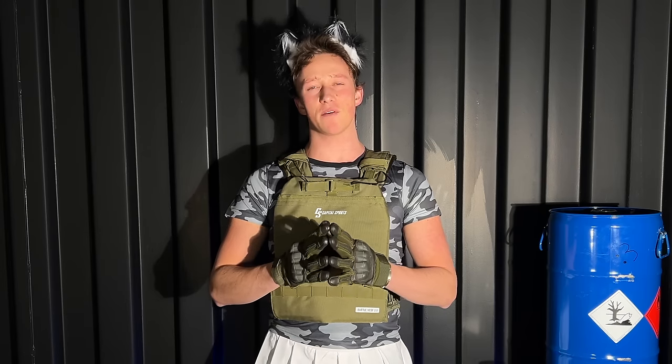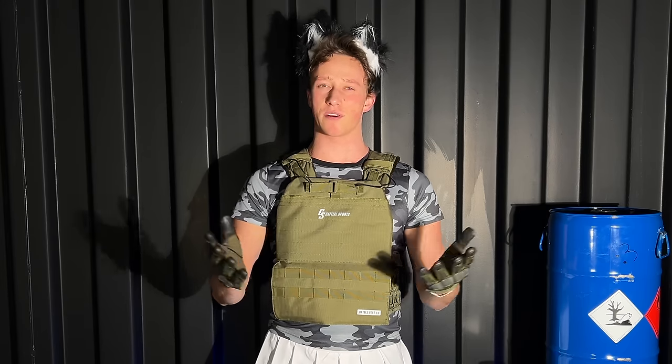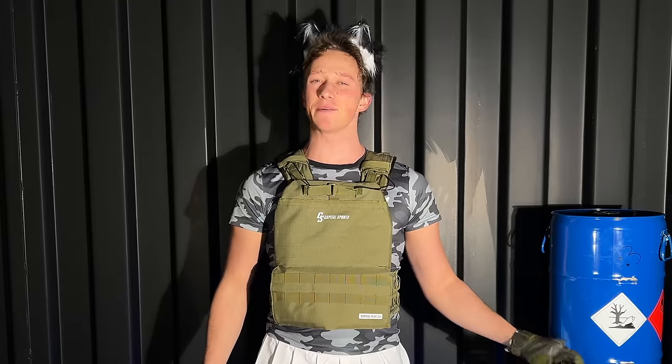You want to see a weird and somewhat crazy German guy show you how to make the strongest tear gas in the world? Well, you came to the right place. Today, I will show you how to make CS.